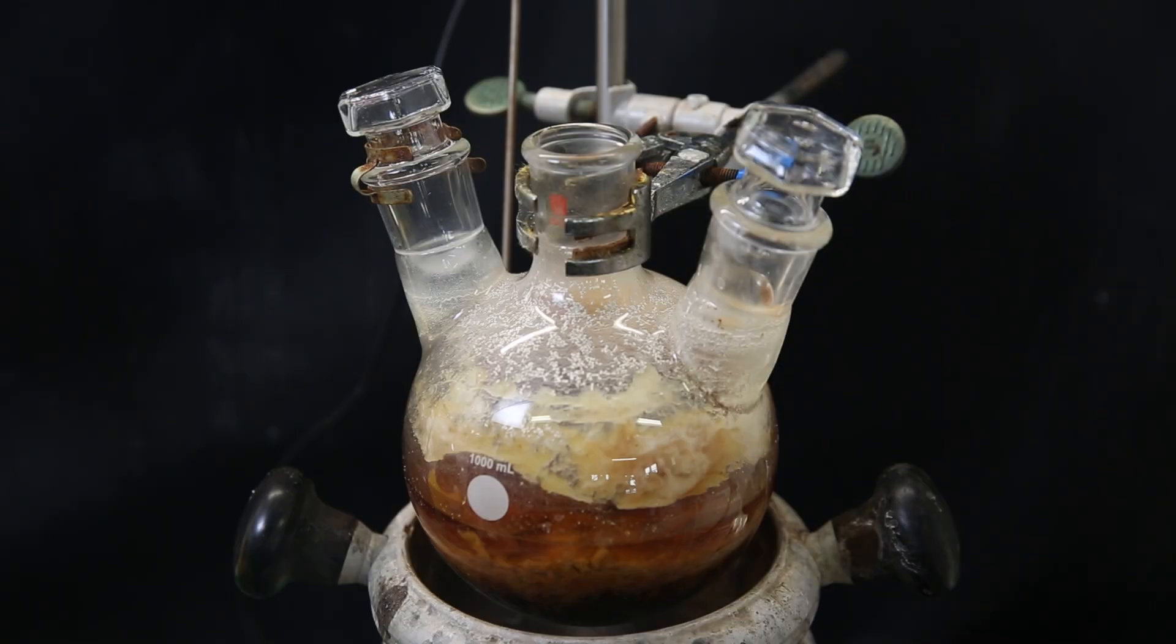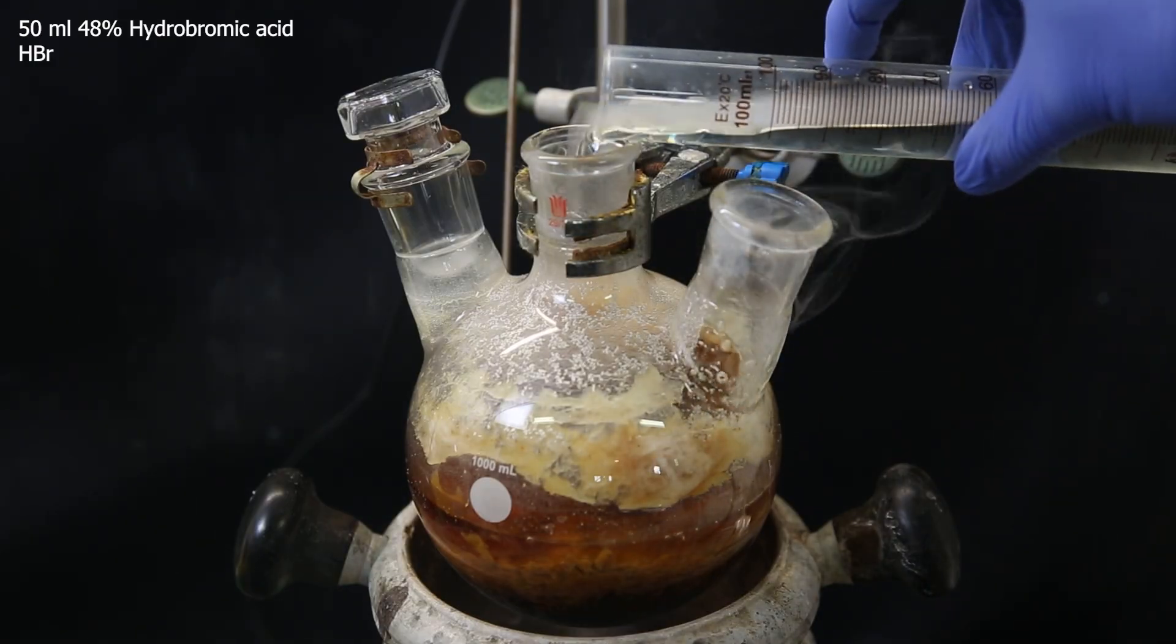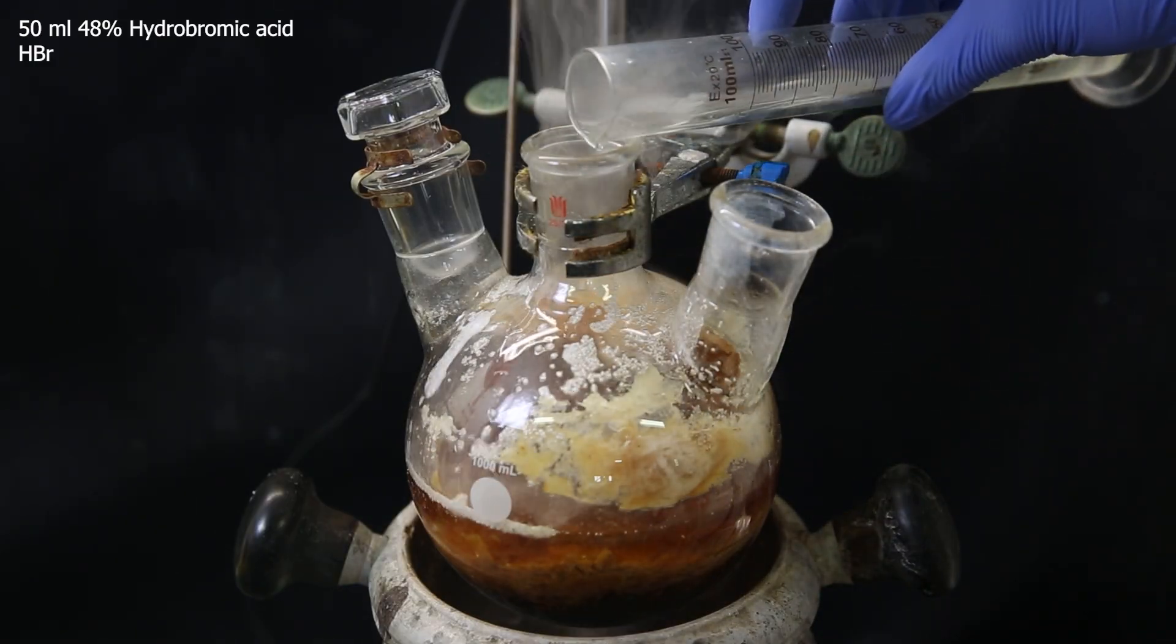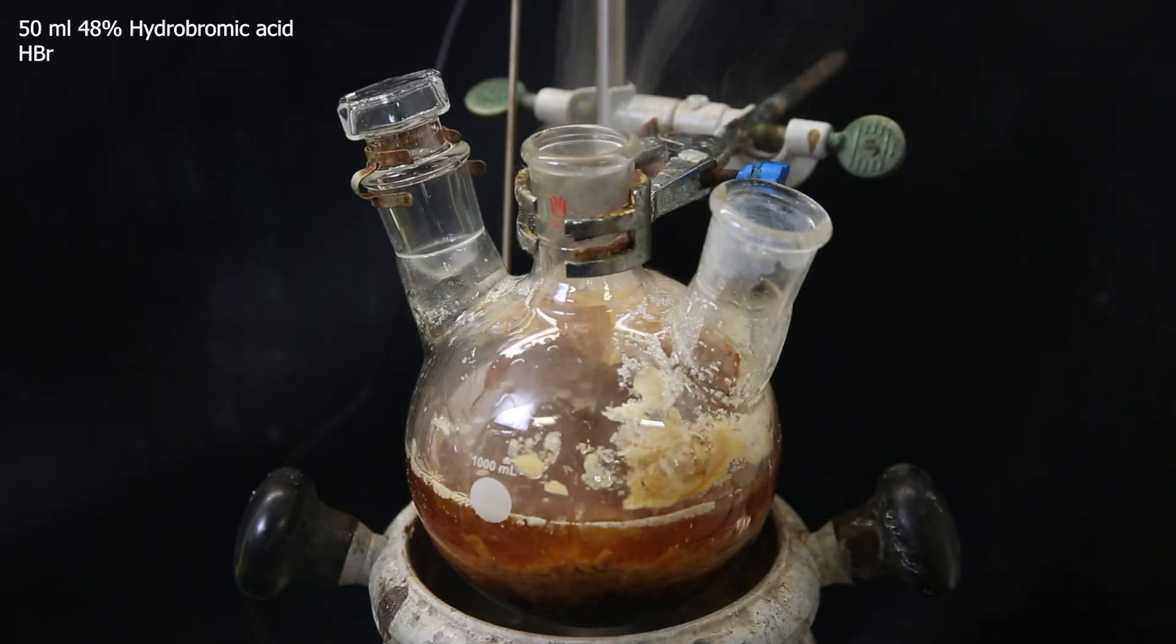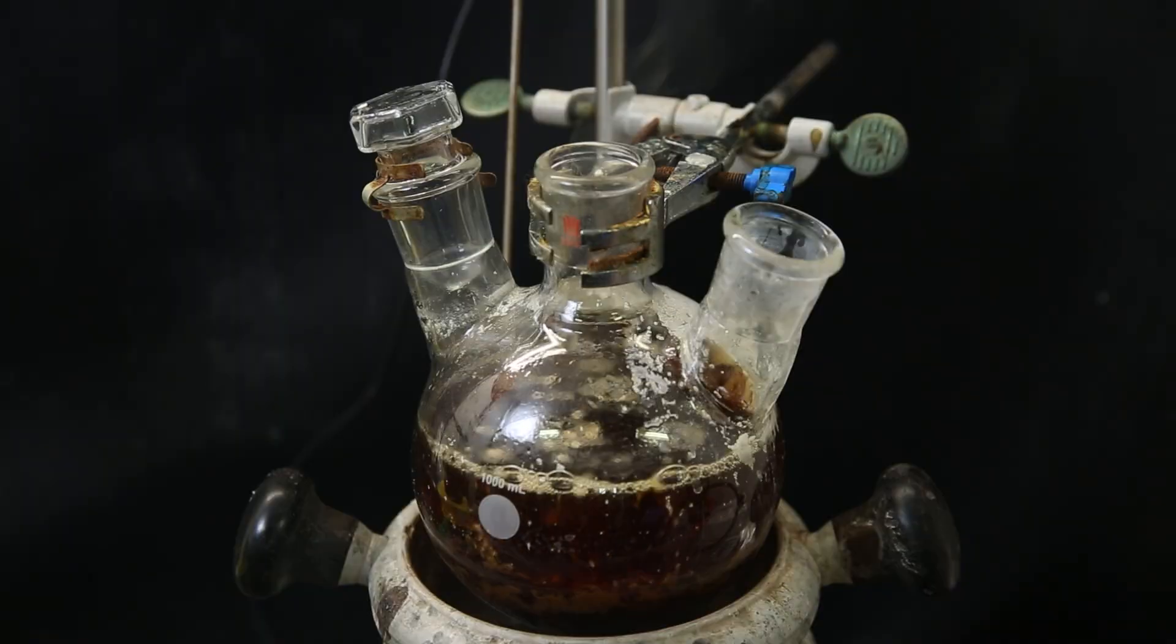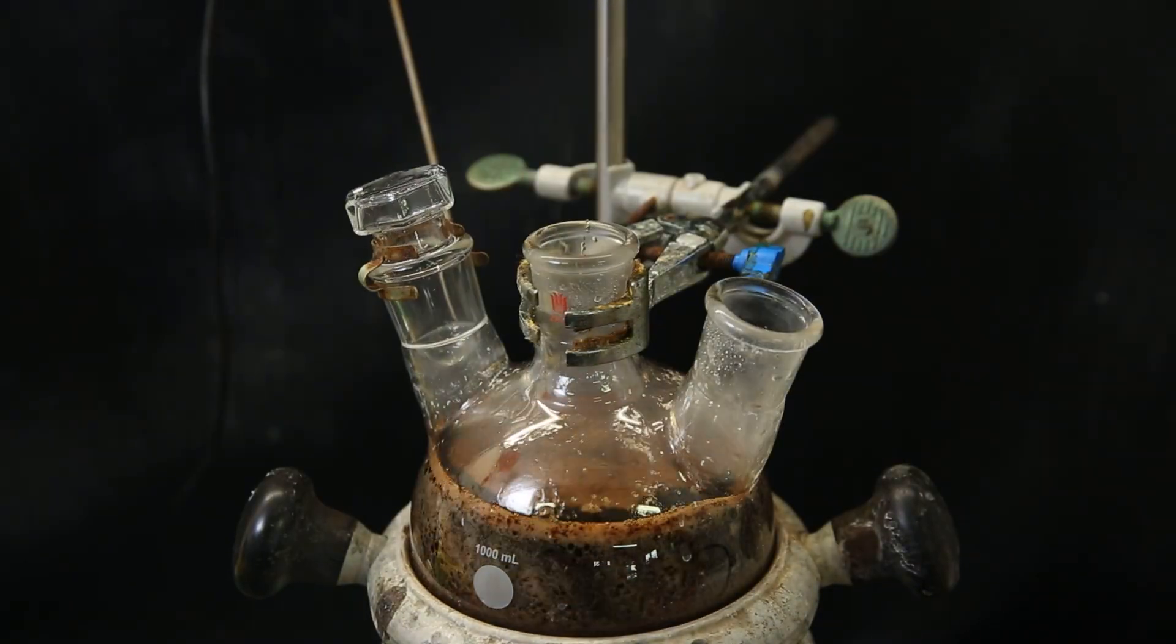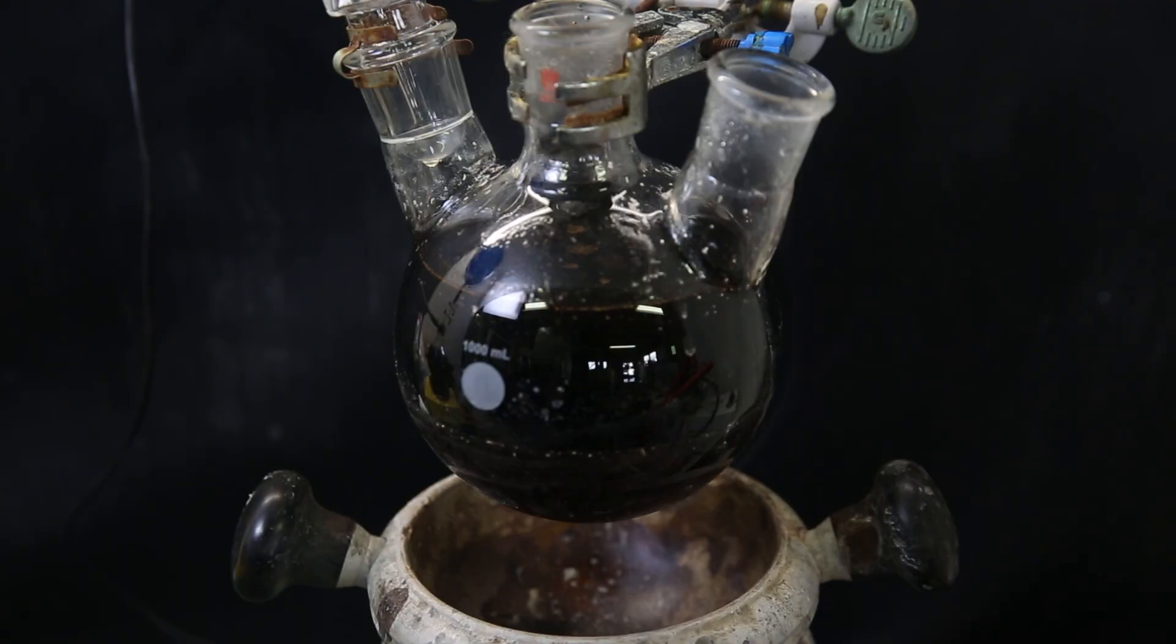When that's done, I hydrolyze all the product, and destroy remaining magnesium by adding 50 ml of 48% hydrobromic acid, and then 100 ml of water to dilute it. I then mix it all around to get it to come loose, and it starts reacting exothermically. When it has all reacted away, except for a little bit of magnesium, I am left with two very dark layers.